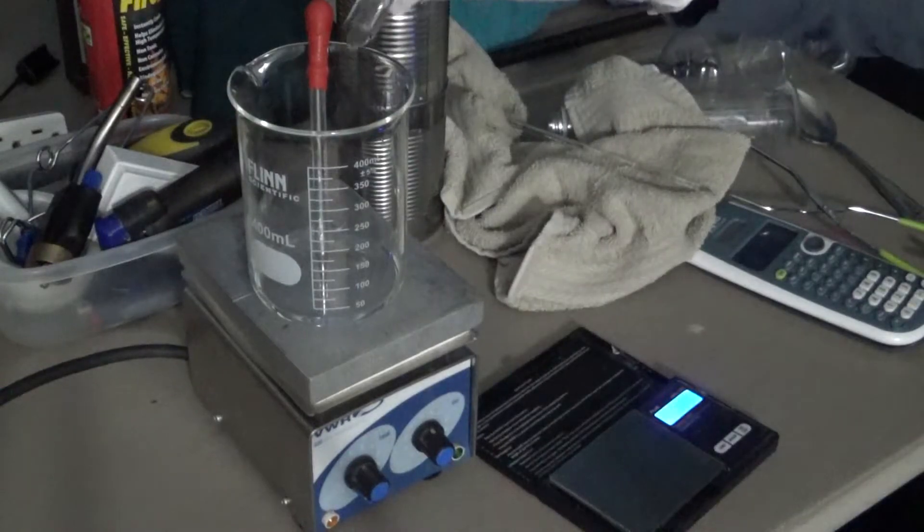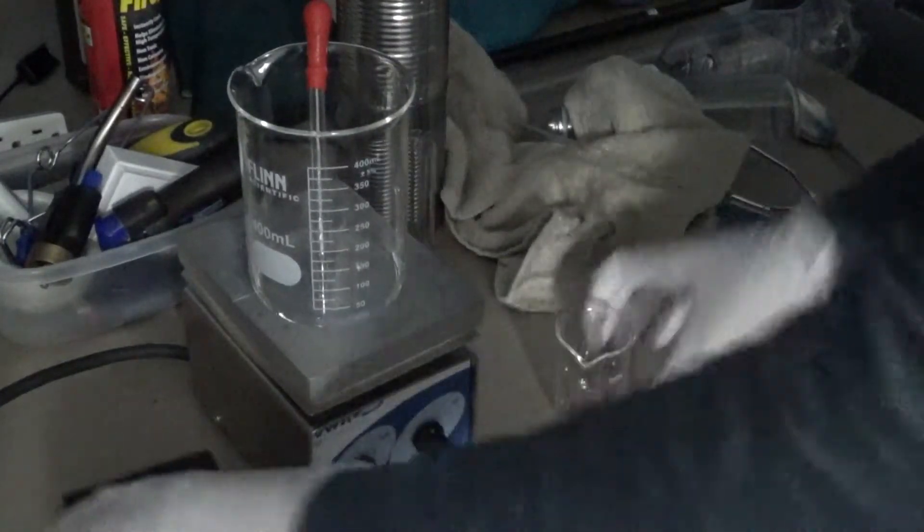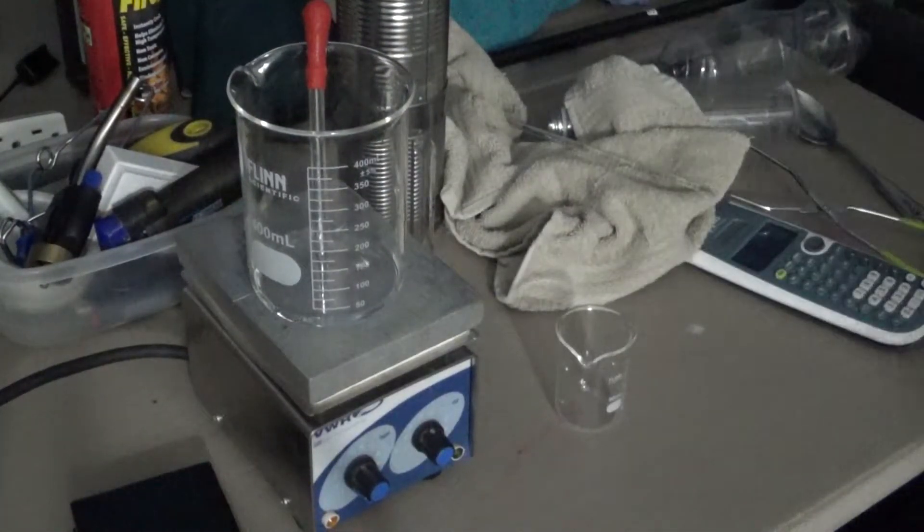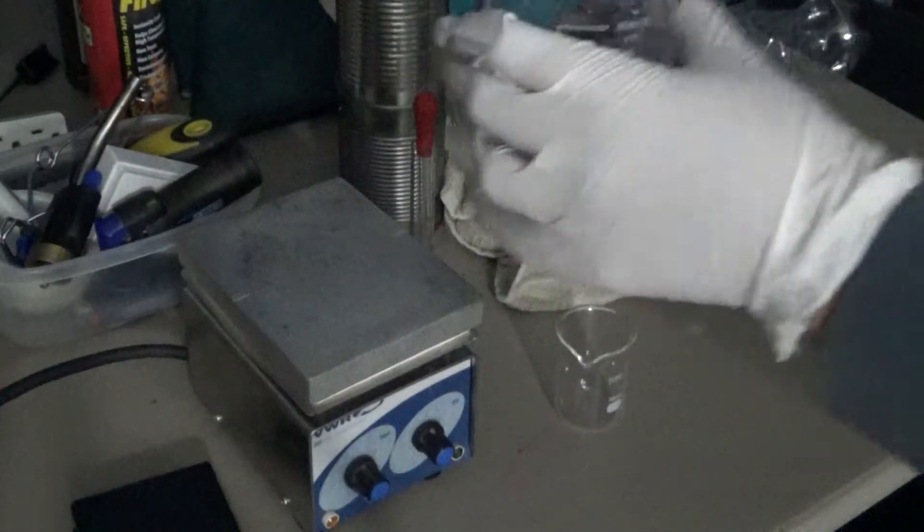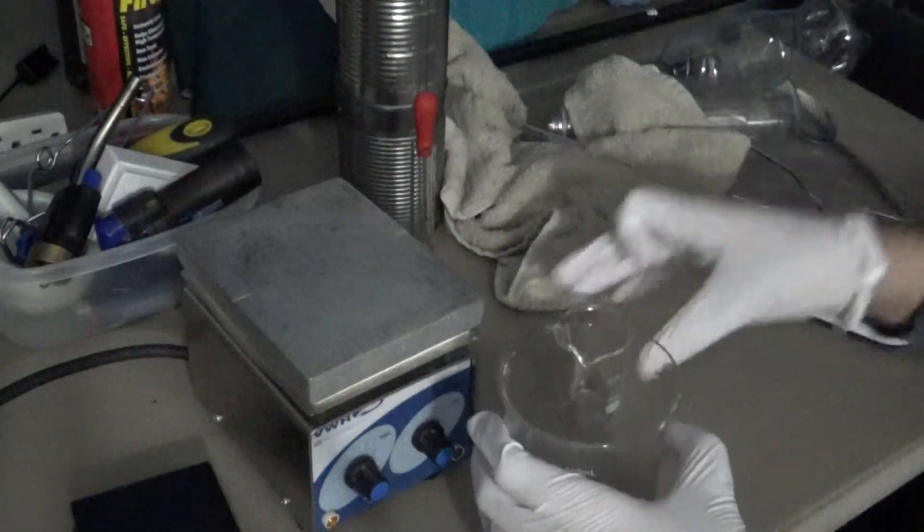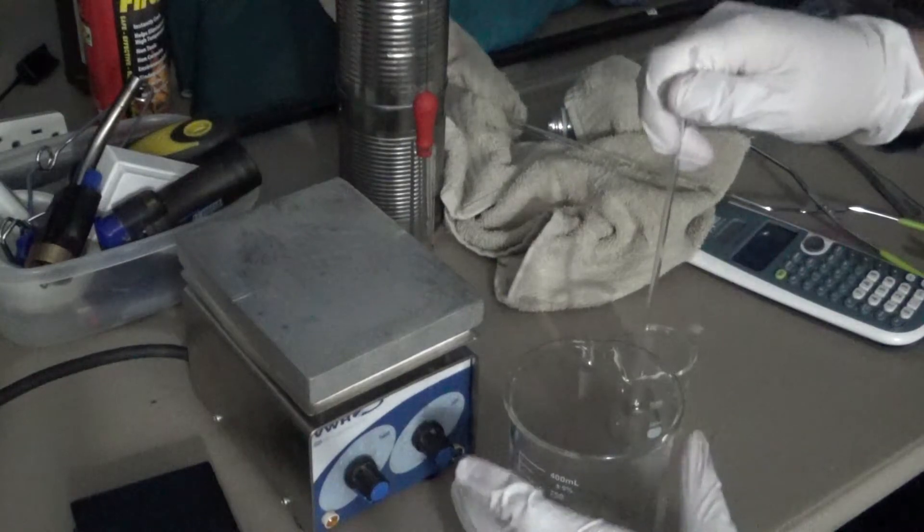Back in the beaker we go, and I'm going to transfer all of this into another smaller beaker. This one won't fit in my current vacuum chamber, so this one will. Nice and small.